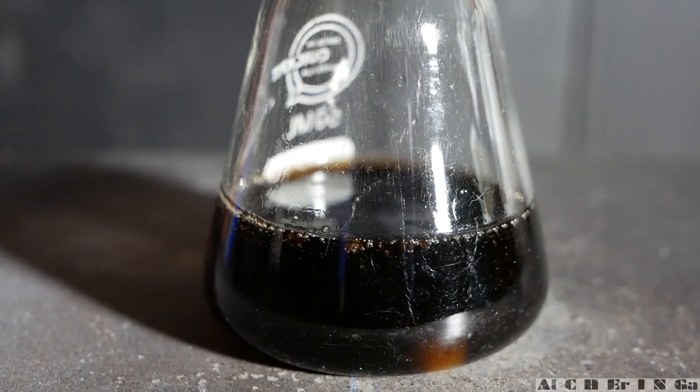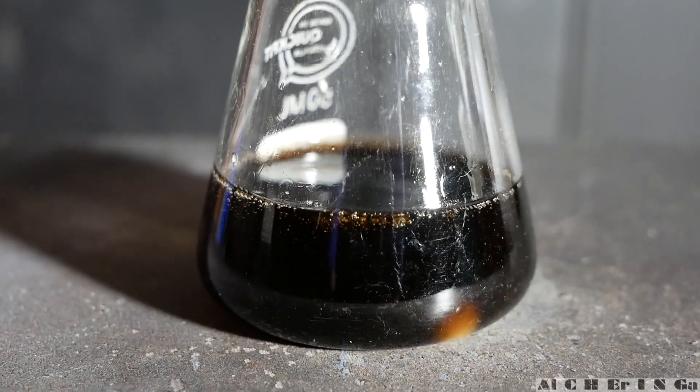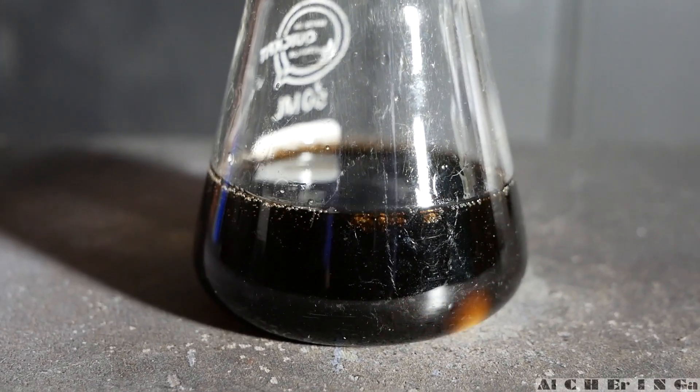Taking a closer look, the mixture has darkened and some bubbles seem to be emitted resembling the Coca-Cola soft drink.